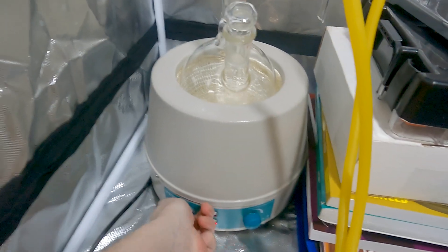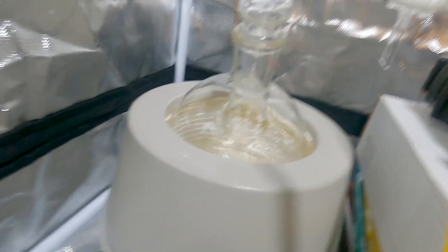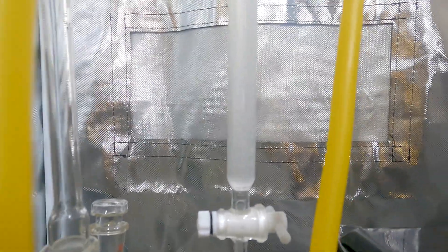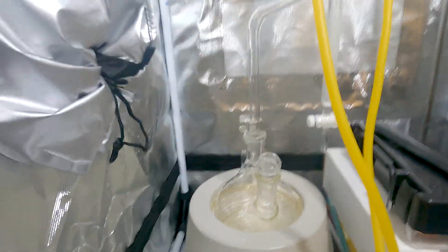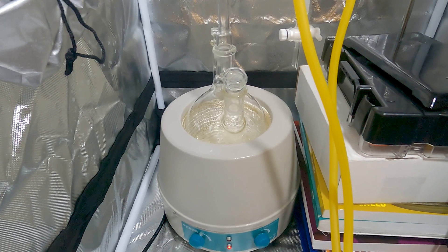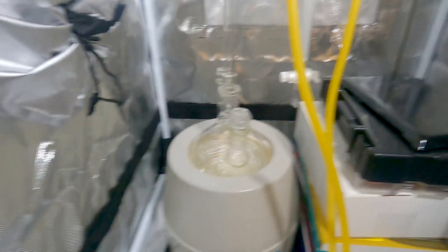We are going to cut it off here at just about three hours of reflux. I figured out that the mil and a half looking phase separation there actually isn't phase separation — it's just the curvature of the glass. If you look closely, there are tiny, tiny little pockets of water, probably a tenth of a millimeter, through this whole process. Tomorrow we will make the ketal, and Wednesday we'll do the vacuum distillation because I have vacuum grease coming on Wednesday and I don't want to do it without grease. I also have a gauge because I want to keep the vacuum pretty consistent.